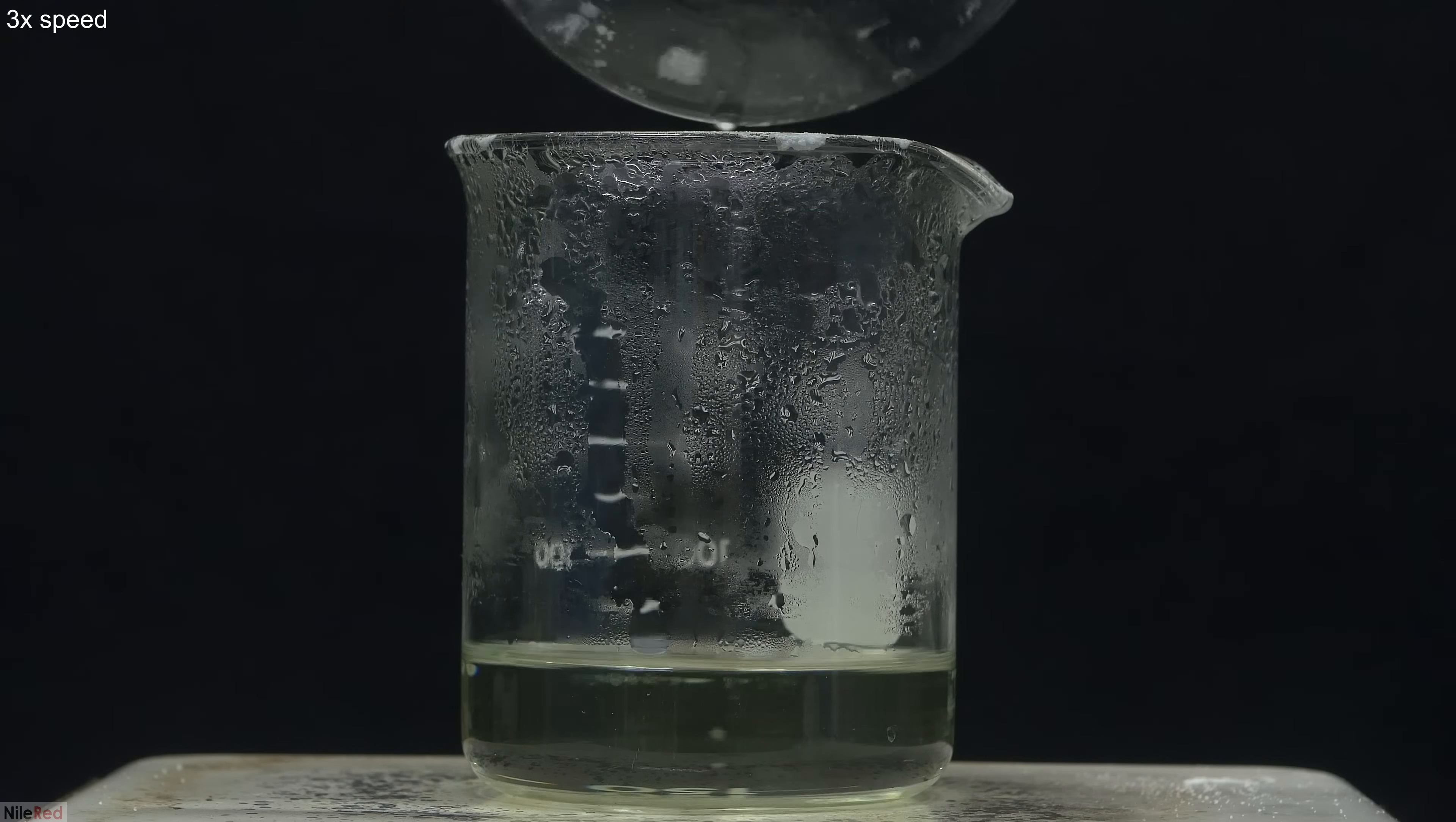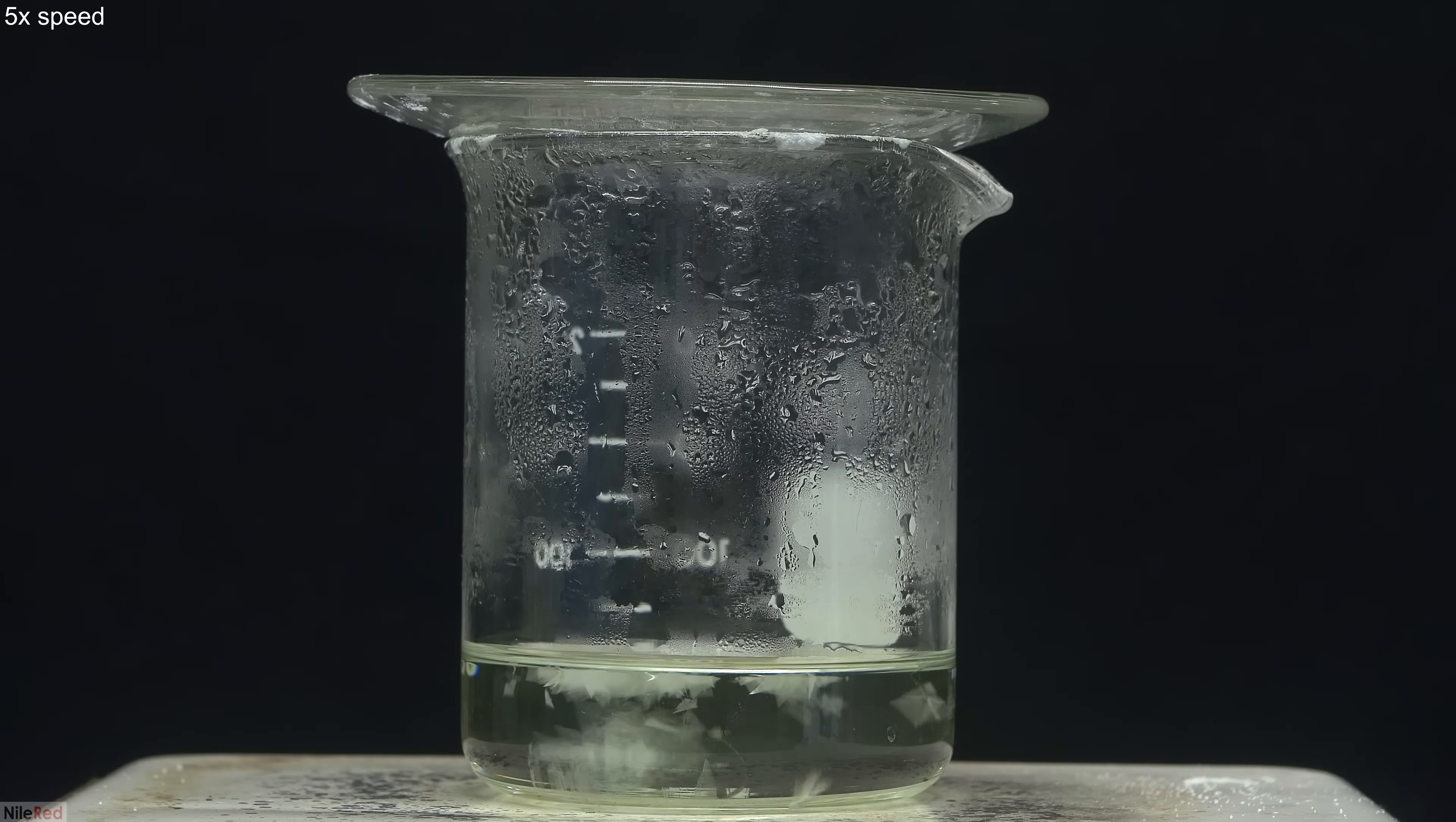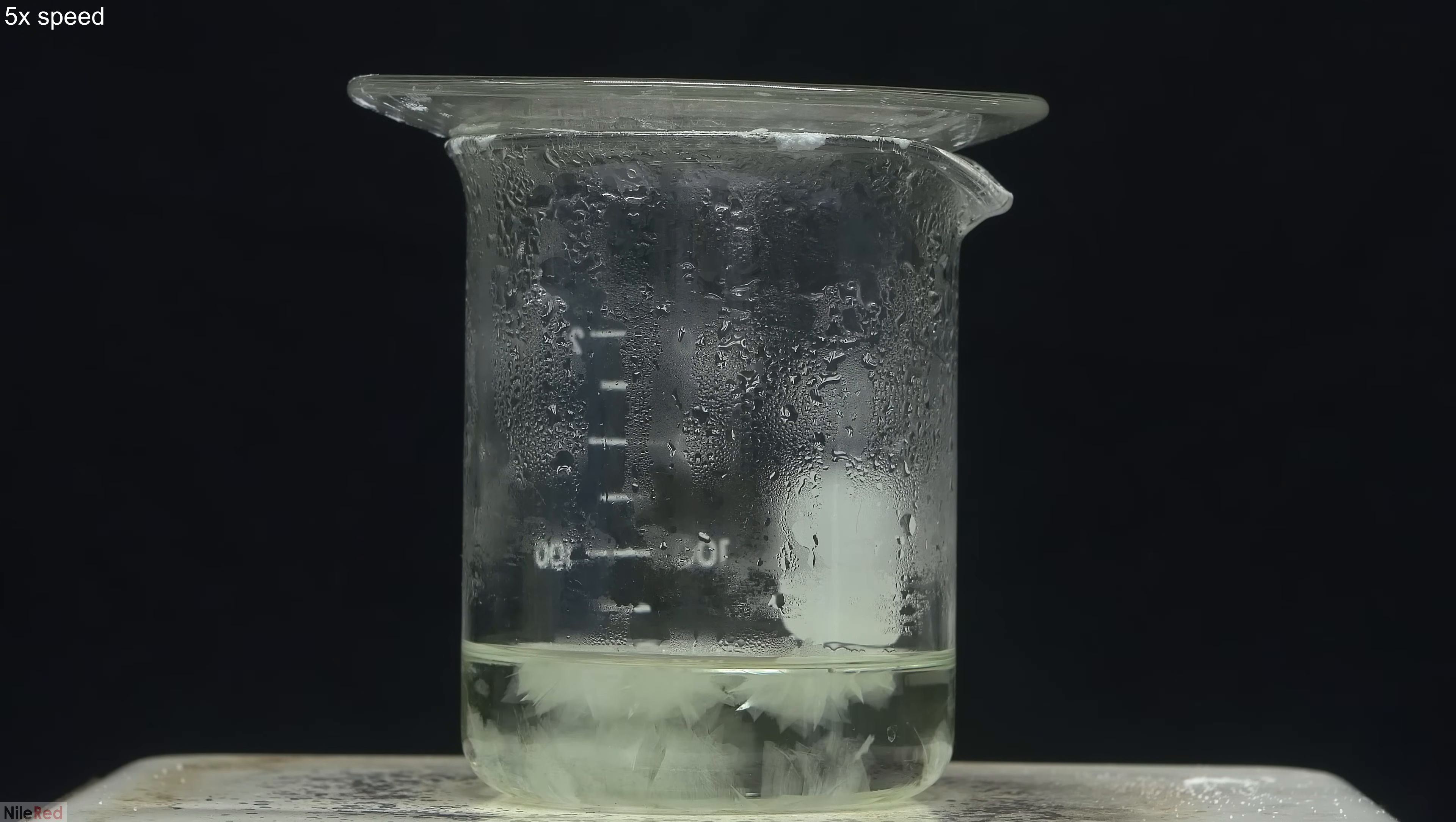To get the solution to crystallize, I'm going to need to provide a seed crystal. There were some crystals that formed on the watch glass, so I knocked these in and you can see immediately crystals start to form.